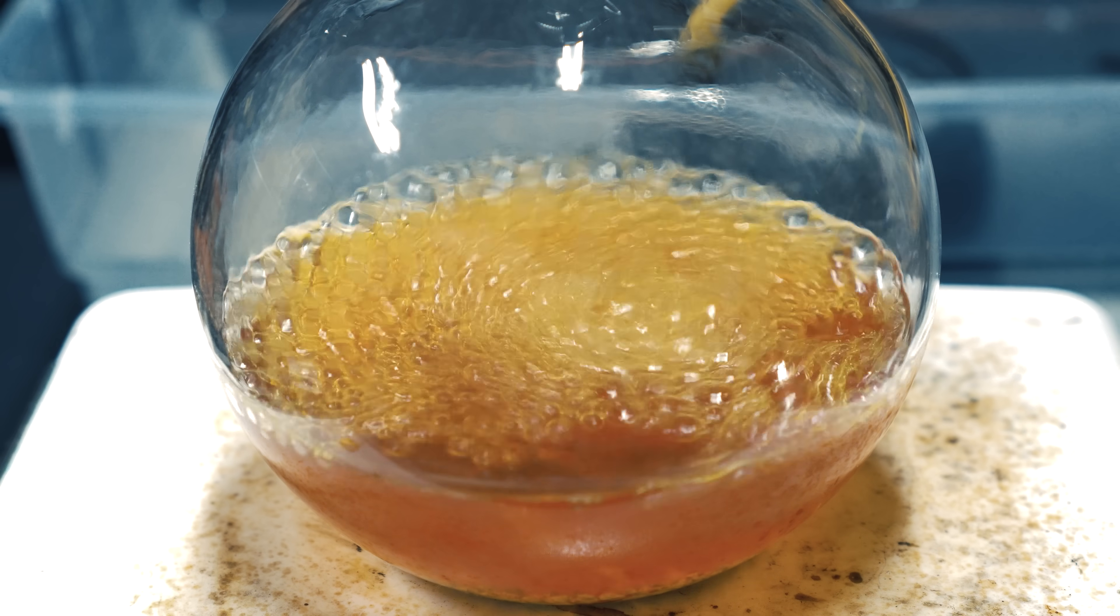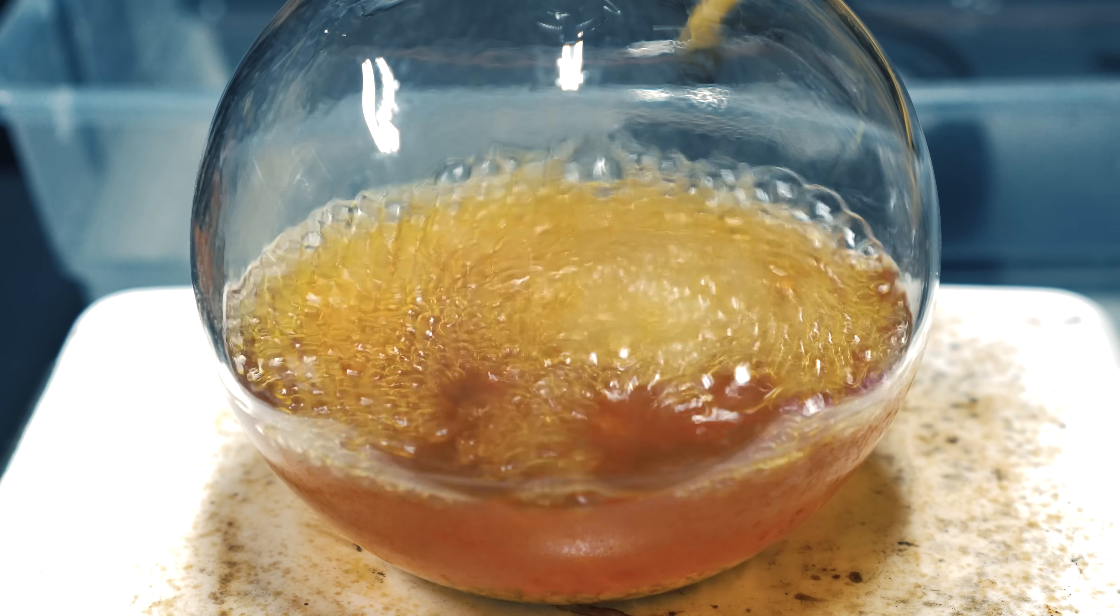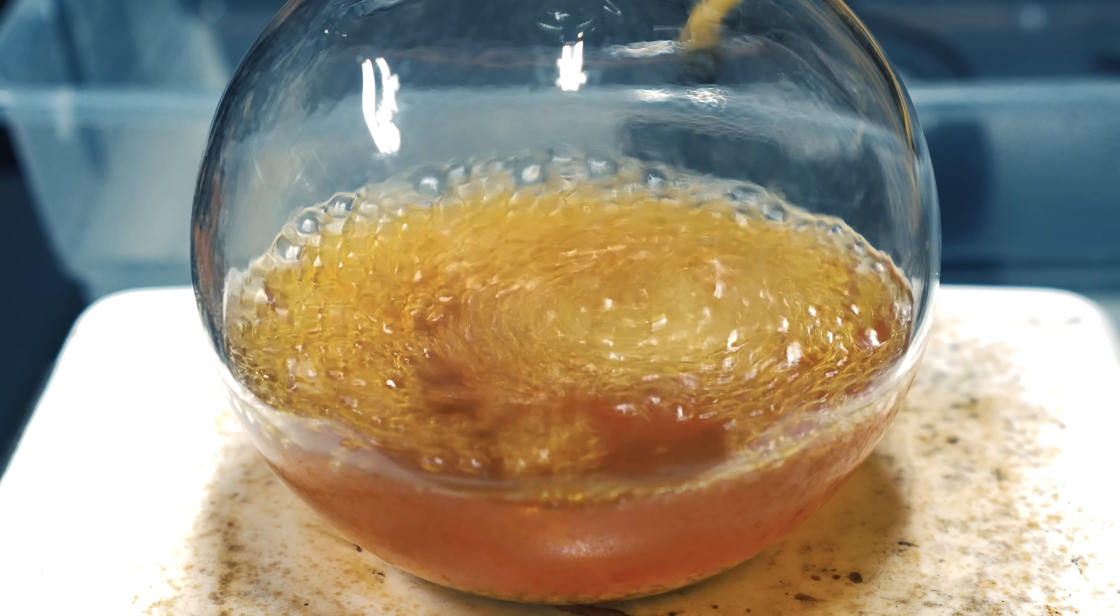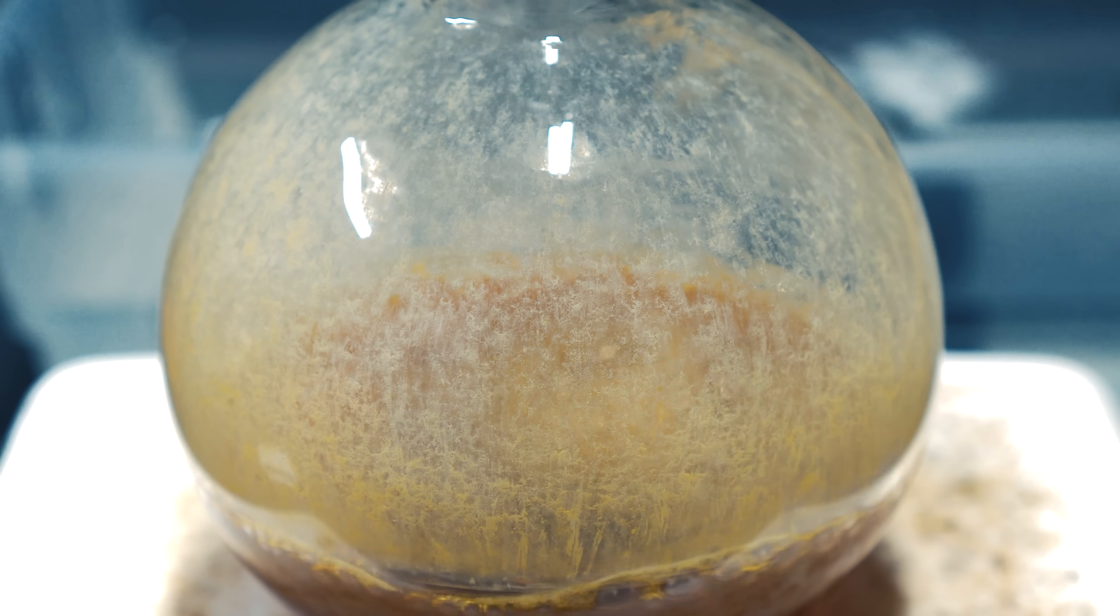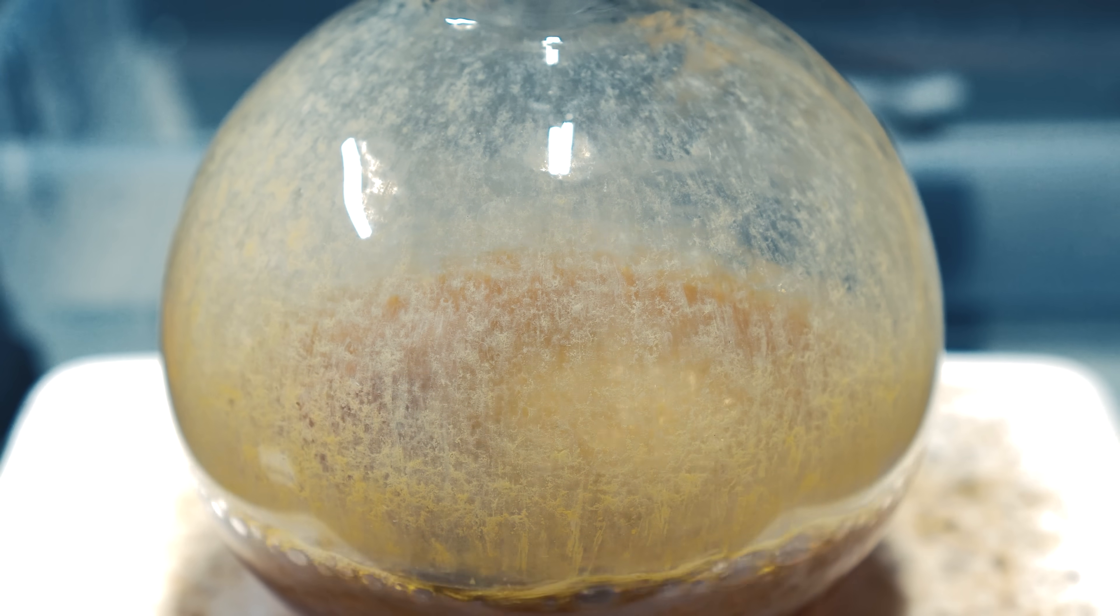What's really interesting is maybe after around 30 minutes, you can see that the flask is coated in this powder. I expected this to be tin chloride, but I could be wrong.